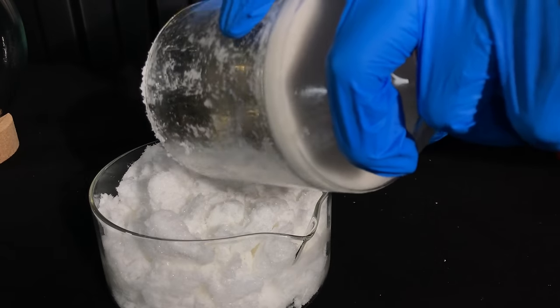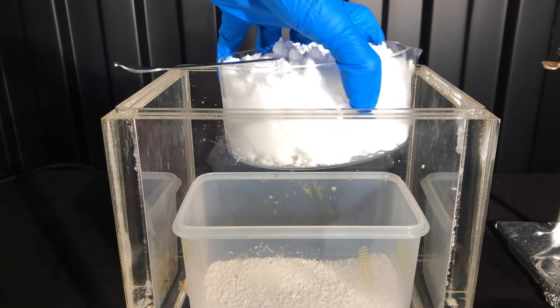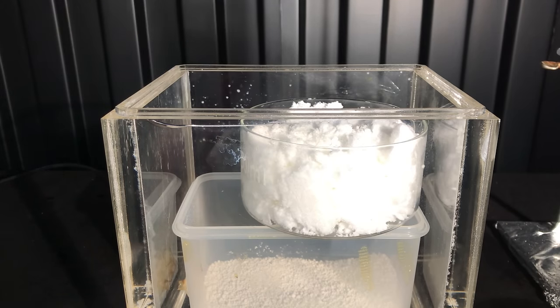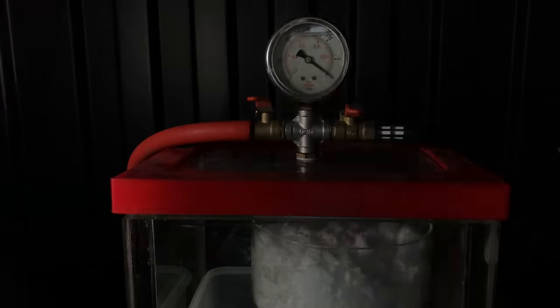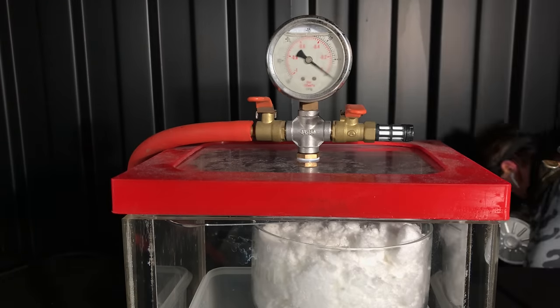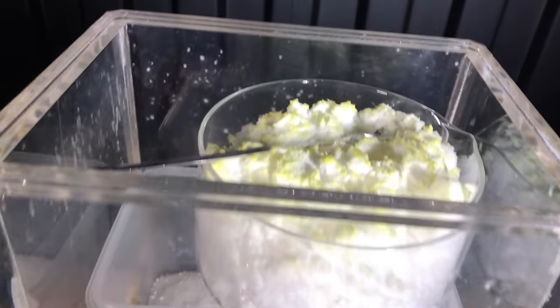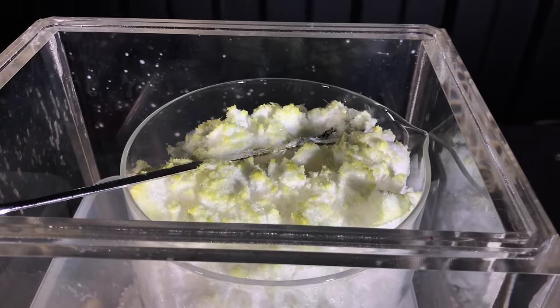No matter how good you are as a chemist, some solvent will stay behind, and no level of degeneracy is going to scare it out of your product. If I can't scare the solvent away, leftover methanol will be removed in a vacuum chamber by putting it over anhydrous calcium chloride. Two days later the product was dry, but it was a little bit yellow at the top.